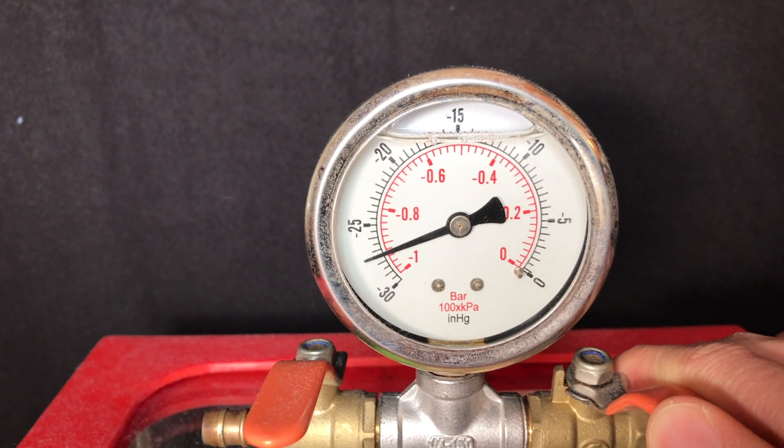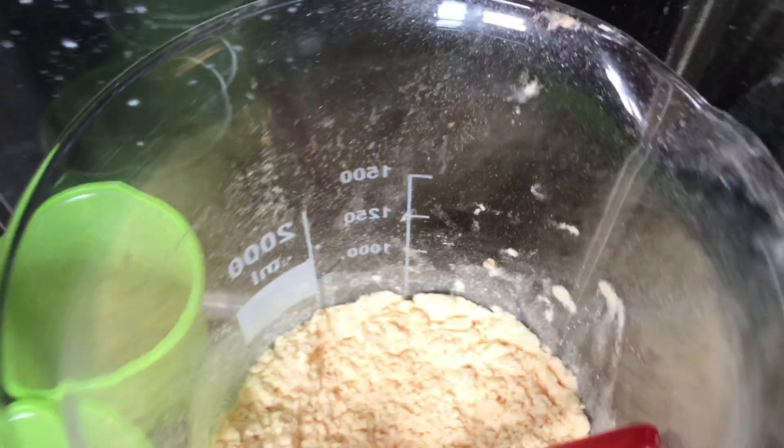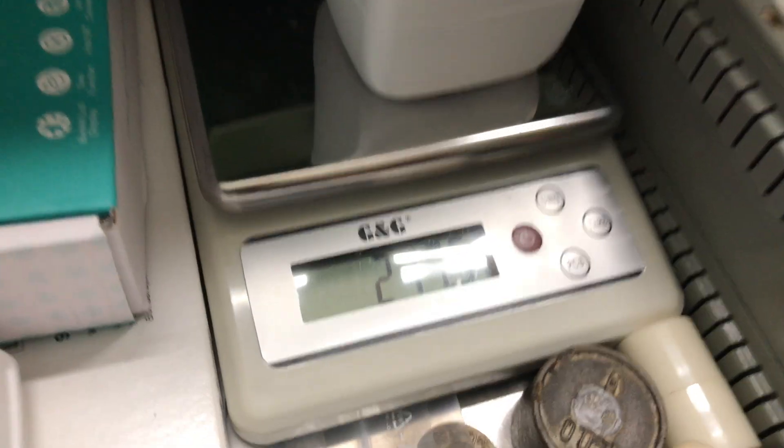But it was dried next to anhydrous calcium chloride and anhydrous potassium hydroxide. And there you go this is our finished bromo vanillin.